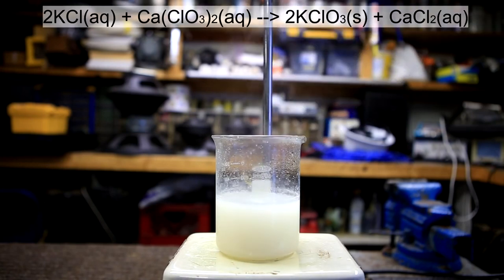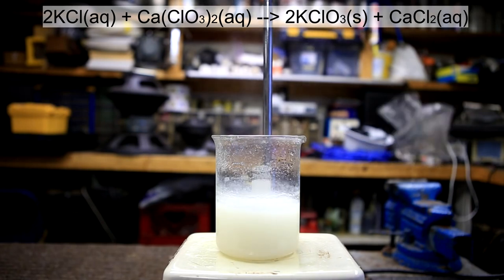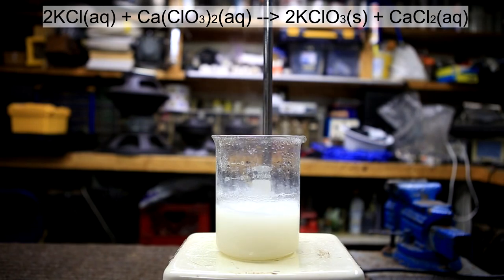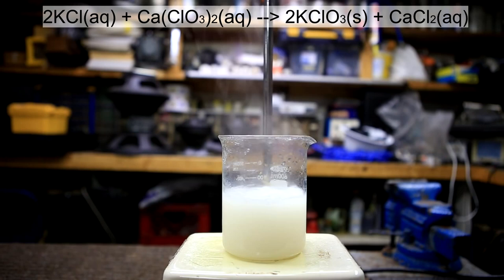The reaction occurring is a double displacement reaction. Potassium chloride reacts with calcium chlorate to produce potassium chlorate and calcium chloride. The potassium chlorate is quite insoluble in water and as the solution cools it will precipitate out.